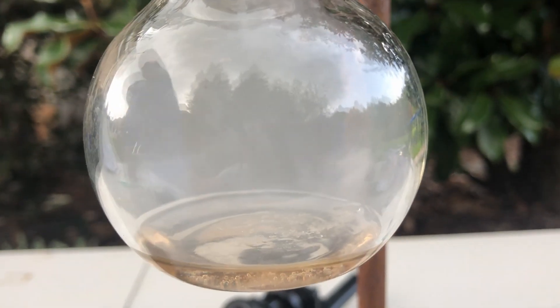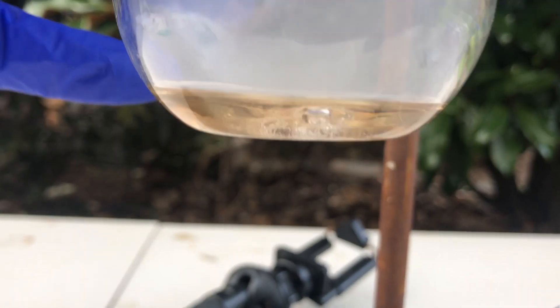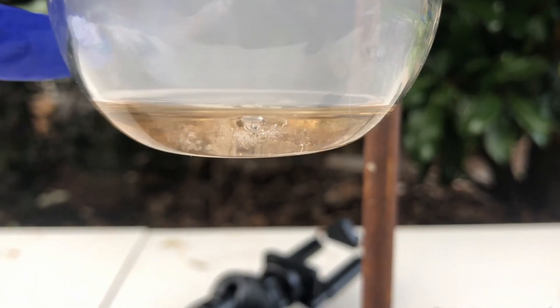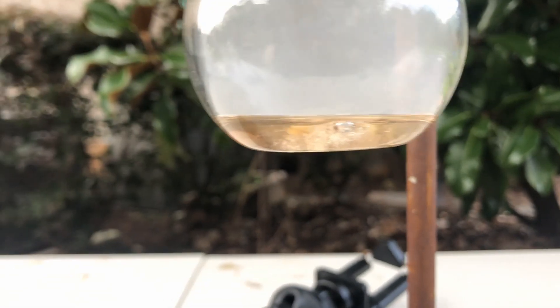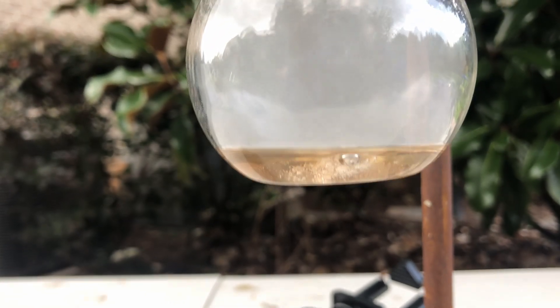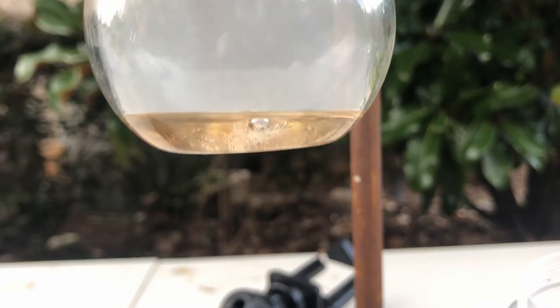So this is what it looks like. It's all melted and mostly dissolved. There's a little bit of polymerized material in there — well, it's sulfur trioxide — but I do get it to dissolve eventually. It is a little brown, but that's because of some organic contamination; honestly it doesn't matter, it's probably just carbon.